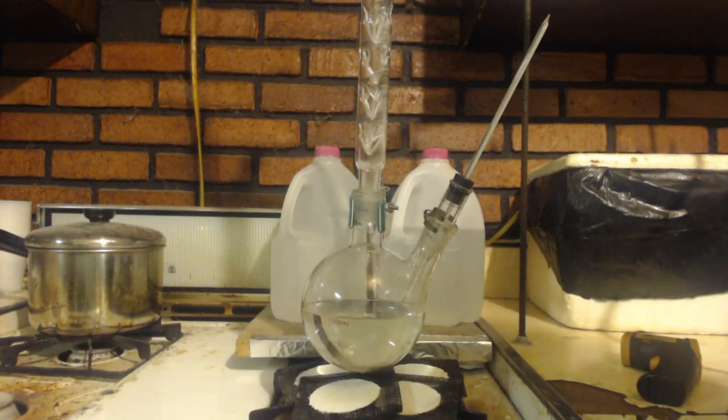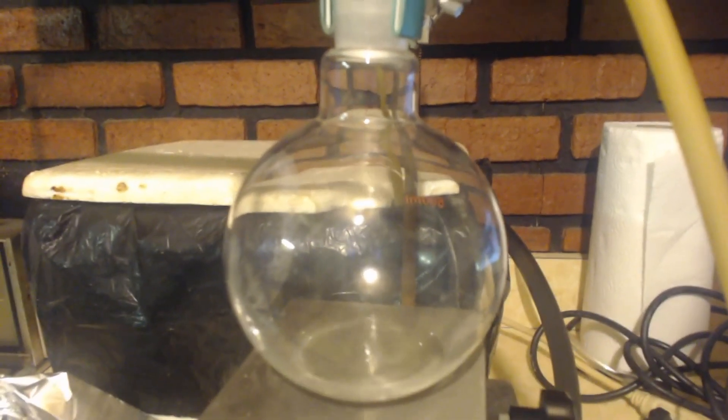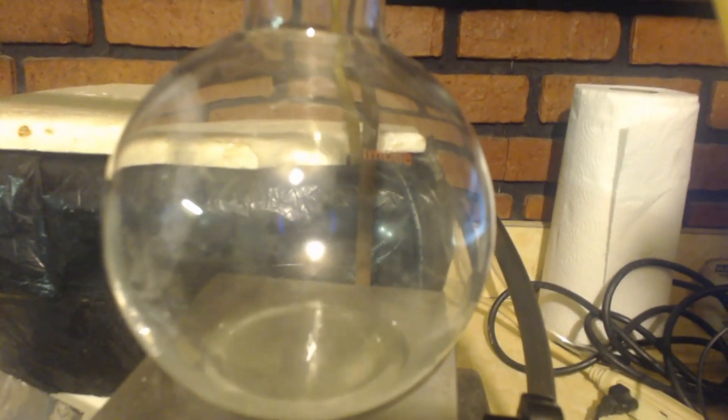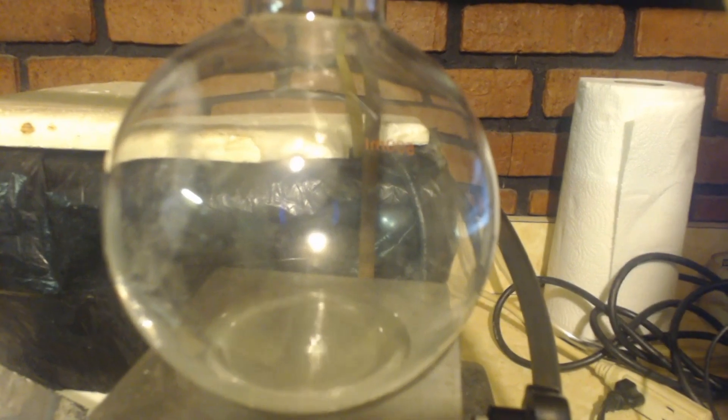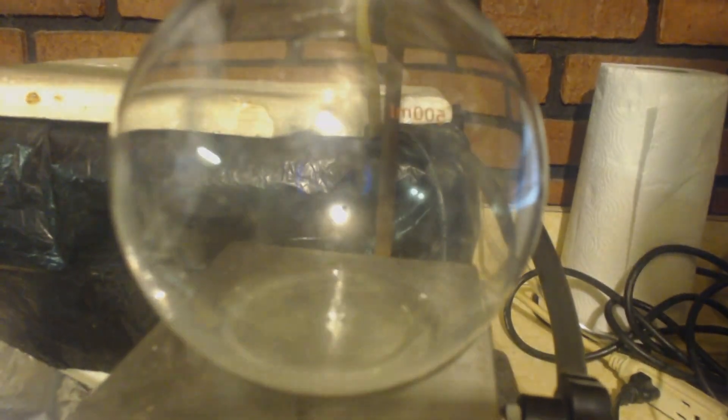You can see over here is the collection flask. First, I'm going to distill up the ether. So there's the receiving flask. You can see it dripping. I'm trying to slow it down. It's actually coming over too fast, but I figure there's a lot of ether going a little fast won't hurt it that much.